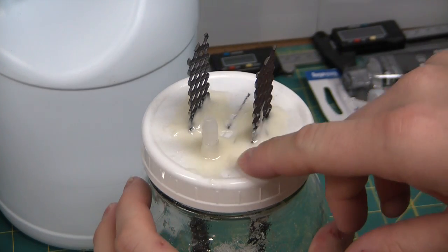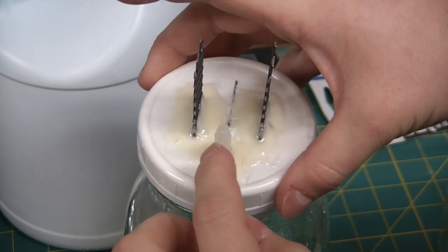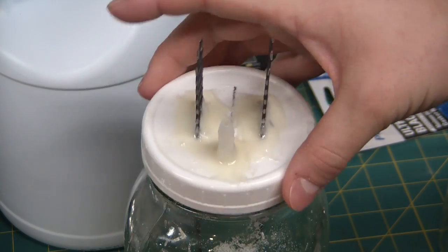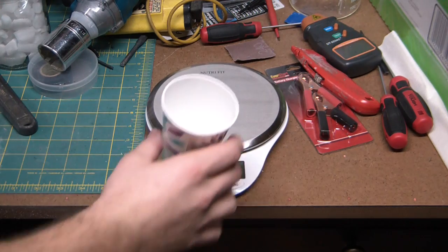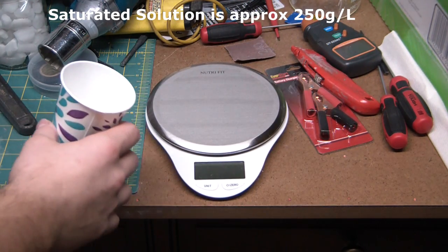Unfortunately, I lost my footage, but you can see I also installed a quarter inch hose barb adapter in the lid here and just epoxied that in. While I'm waiting for the epoxy to set up, I'm gonna prepare a saturated solution of potassium chloride.